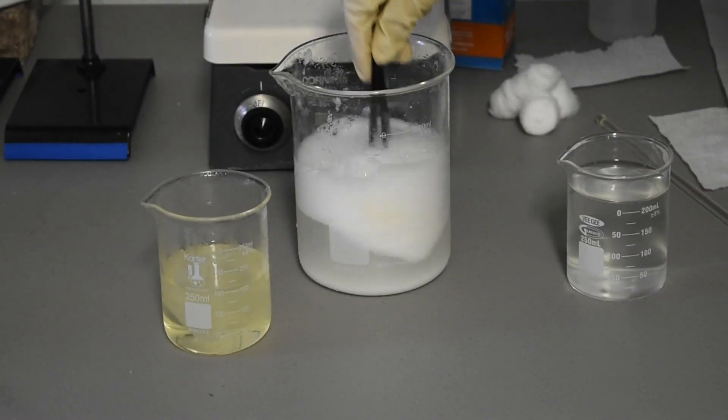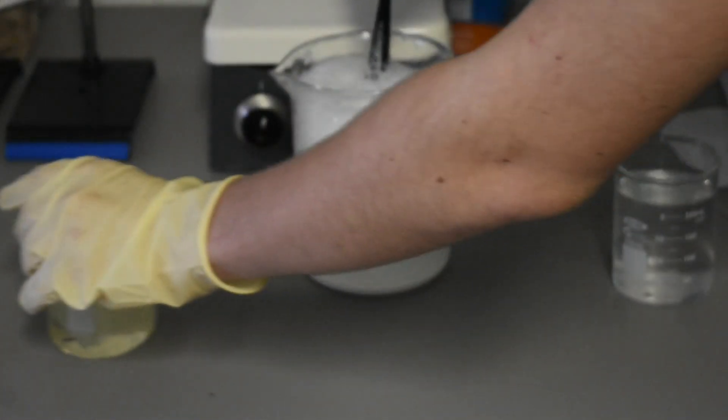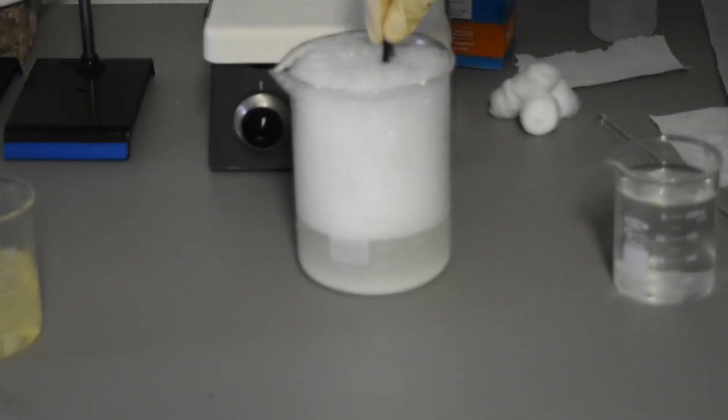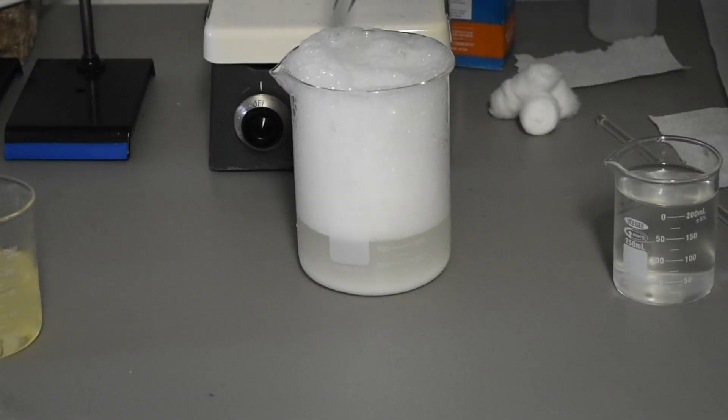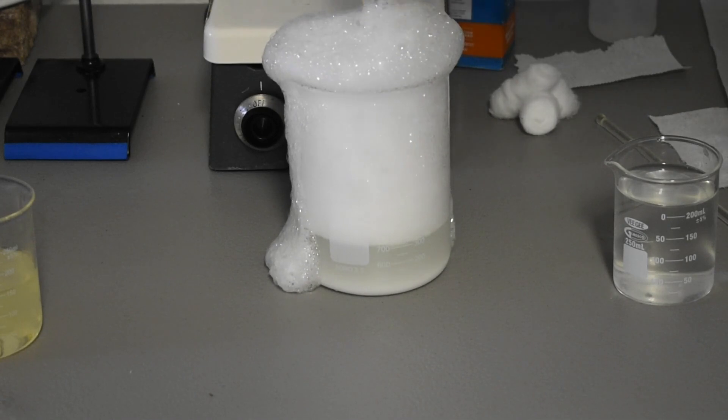I'm going to beat down some of the foam. Try to control, nope, it's probably going to overflow again. Come on, come on. It's a common issue here today.